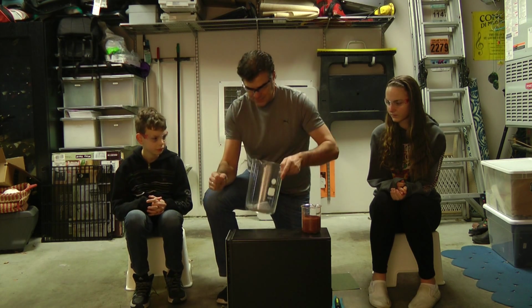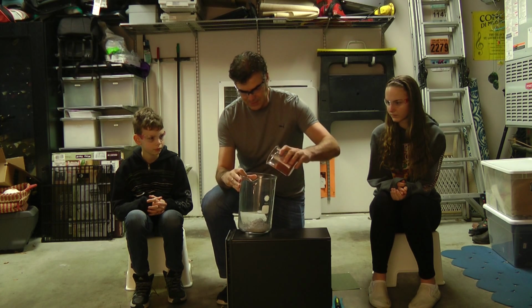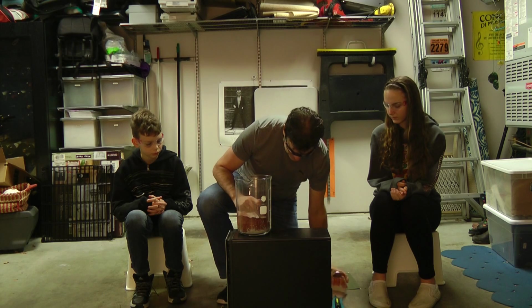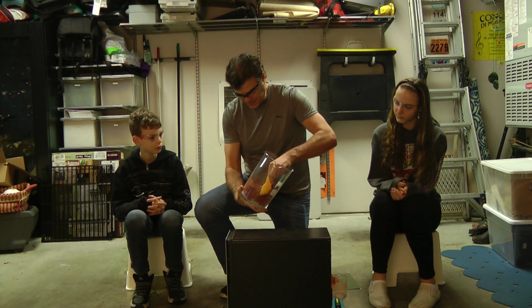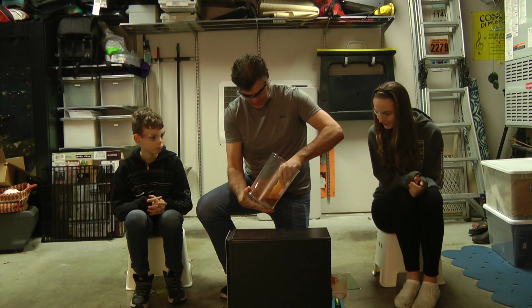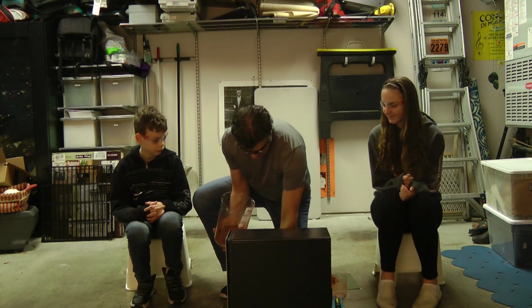So I have this big beaker of aluminum powder here. I just used a big beaker to make it easier to mix. So we're going to mix this together. And let's mix this up. Oh, I'm making a mess. Let's switch to a different tool. Let's use what's called a pestle.